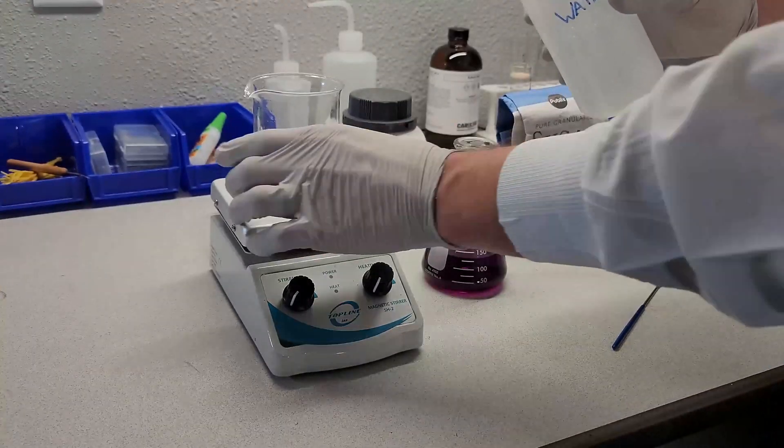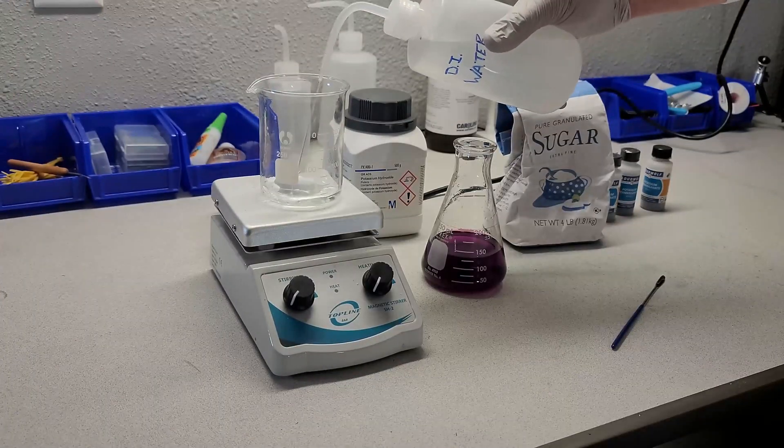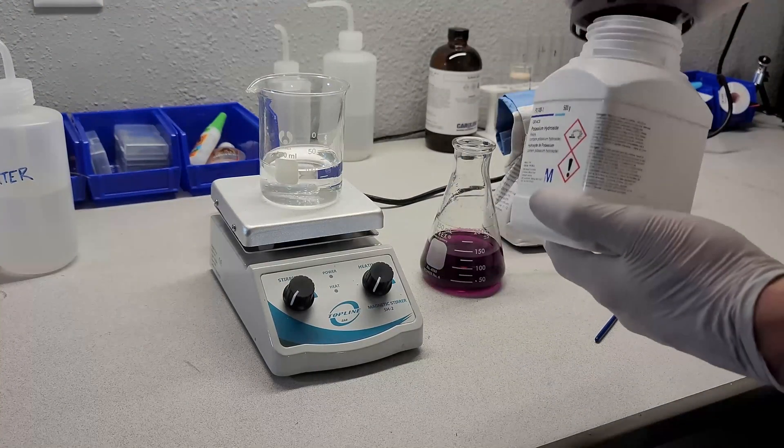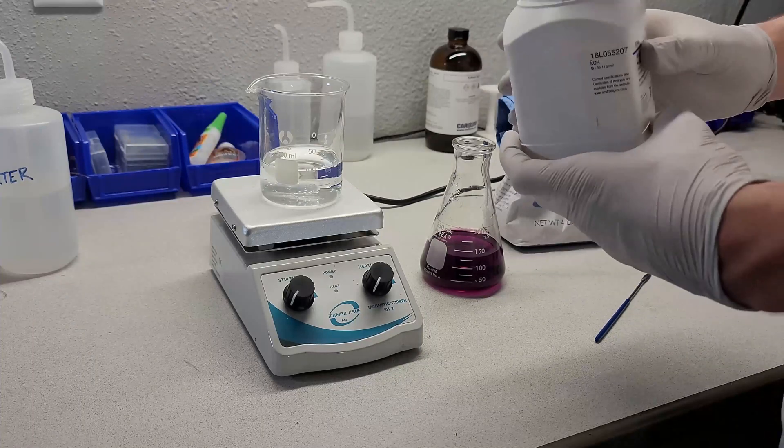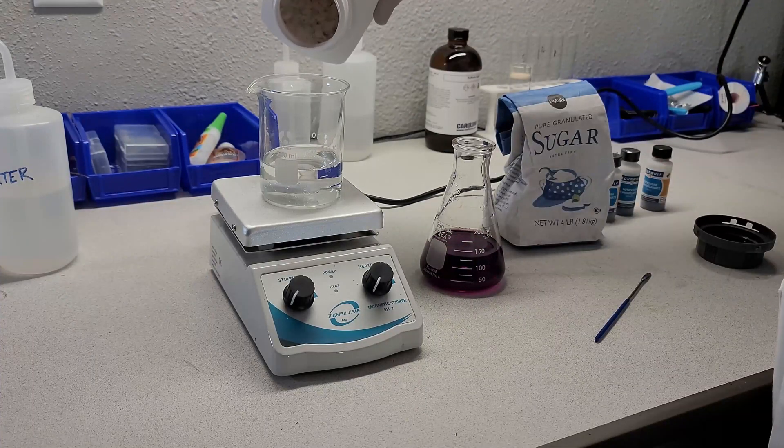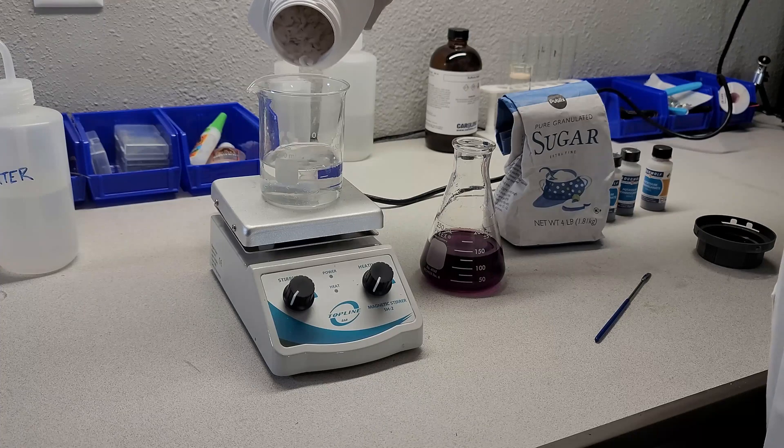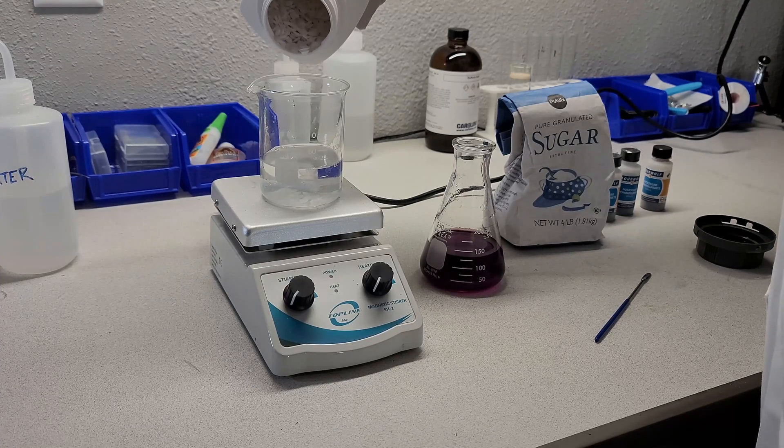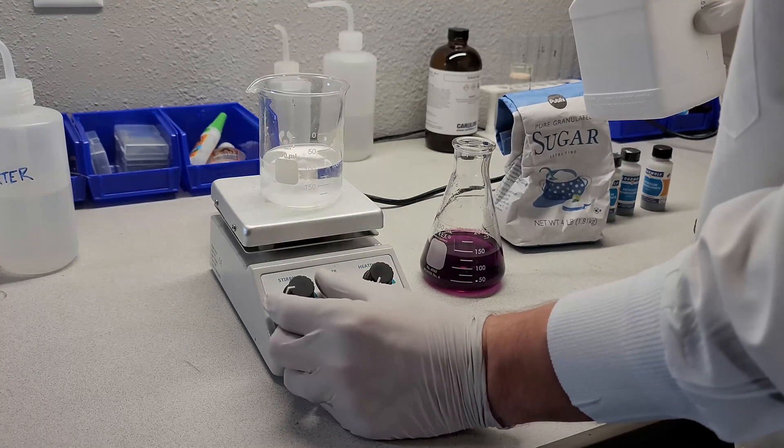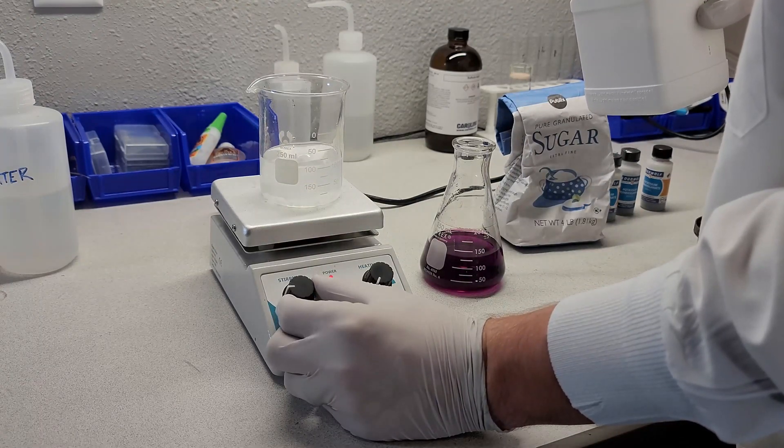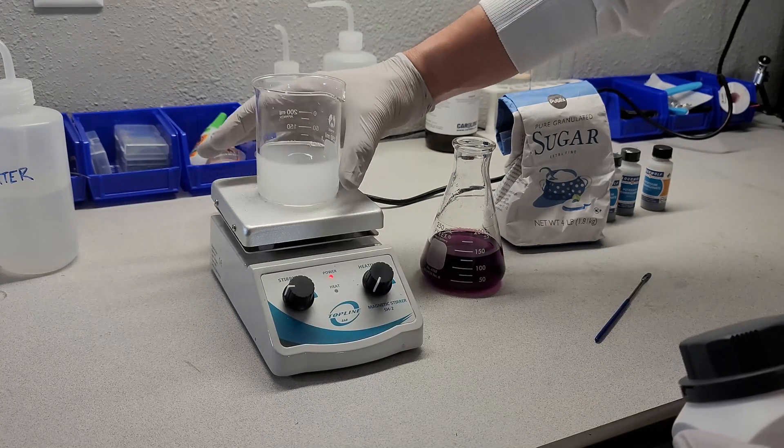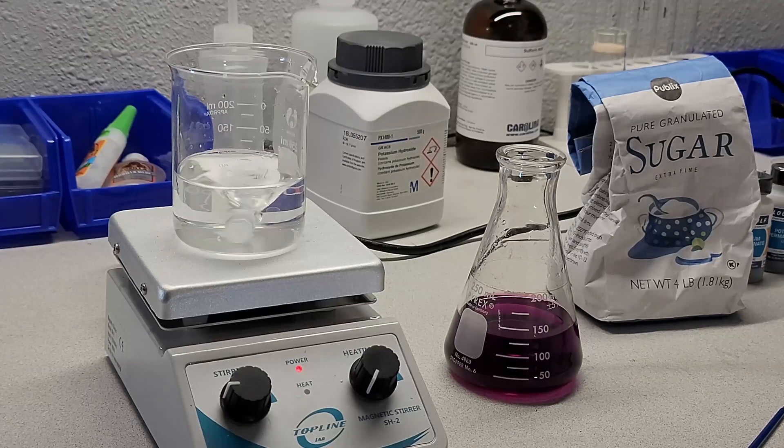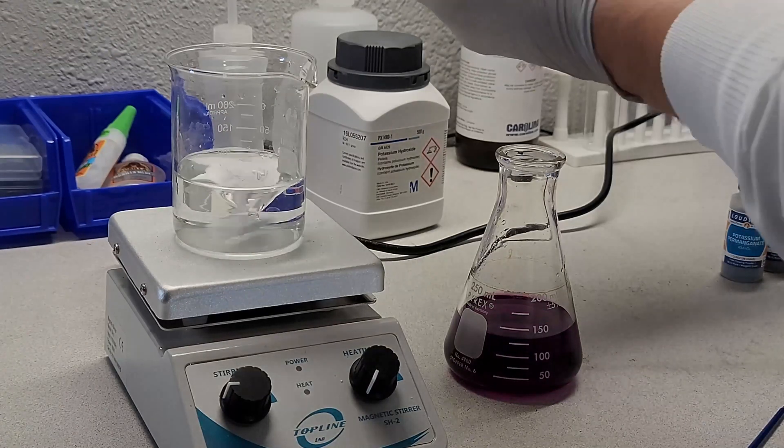In this guy, I'll add another hundred milliliters of water, and we'll go ahead and add our potassium hydroxide. Now potassium hydroxide is a strong base, so when this dissolves, the reaction will be exothermic, meaning the water will heat up. So we'll go ahead and turn on that stir bar, and even without heat, you can tell it's starting to get a little warm. Okay, since that looks dissolved, I'm going to go ahead and add our sugar.